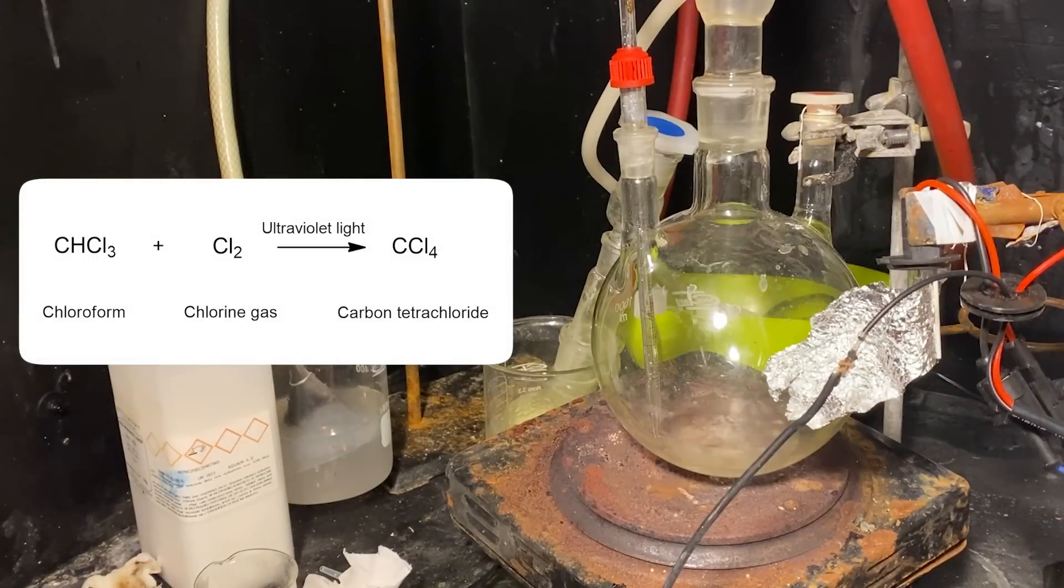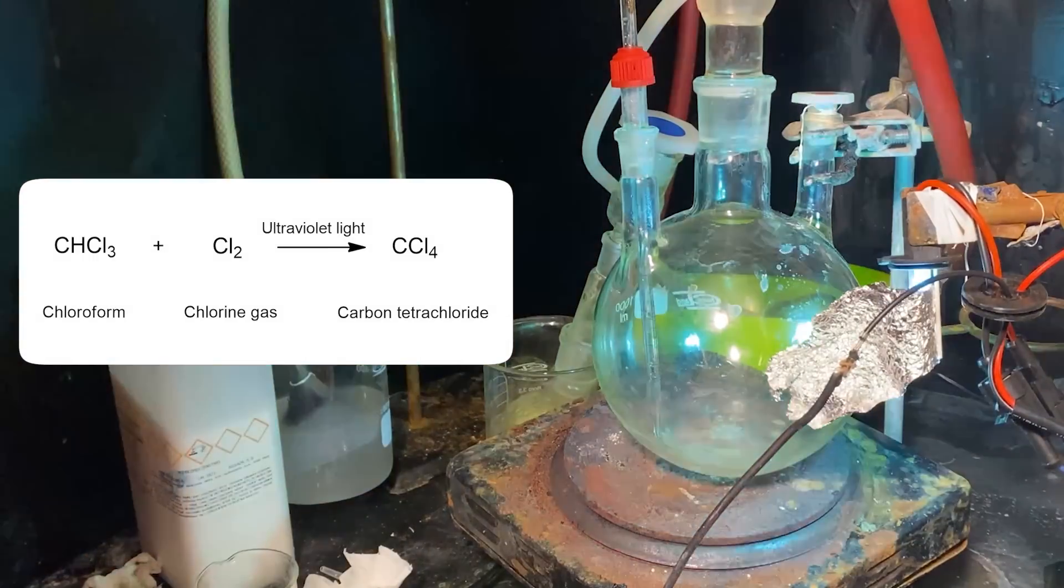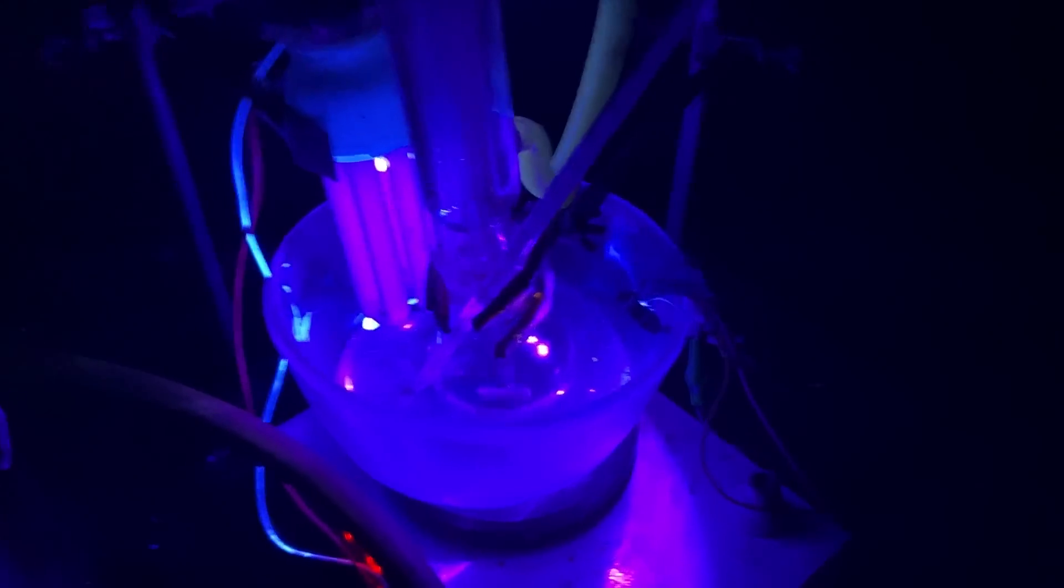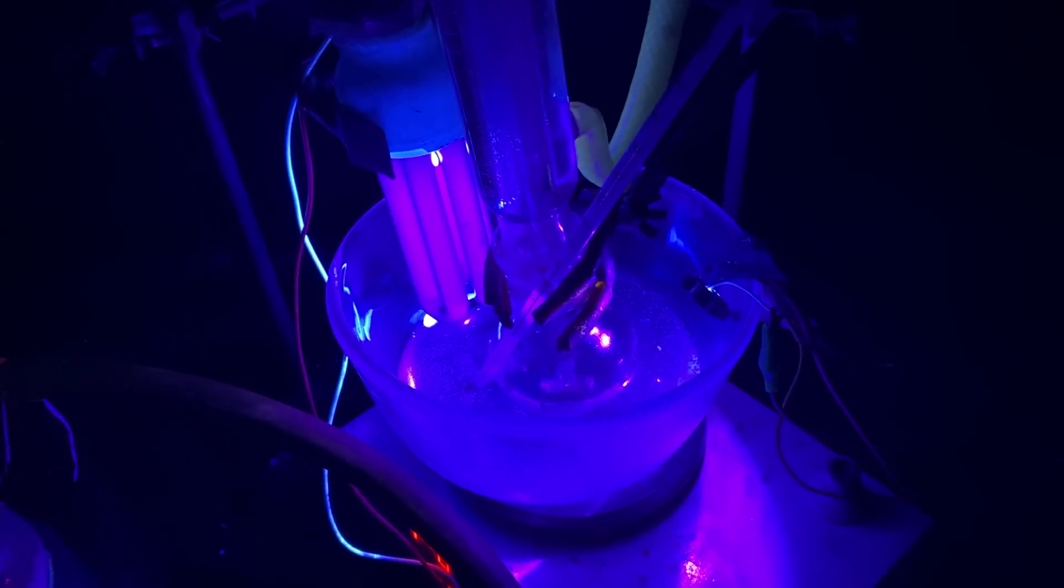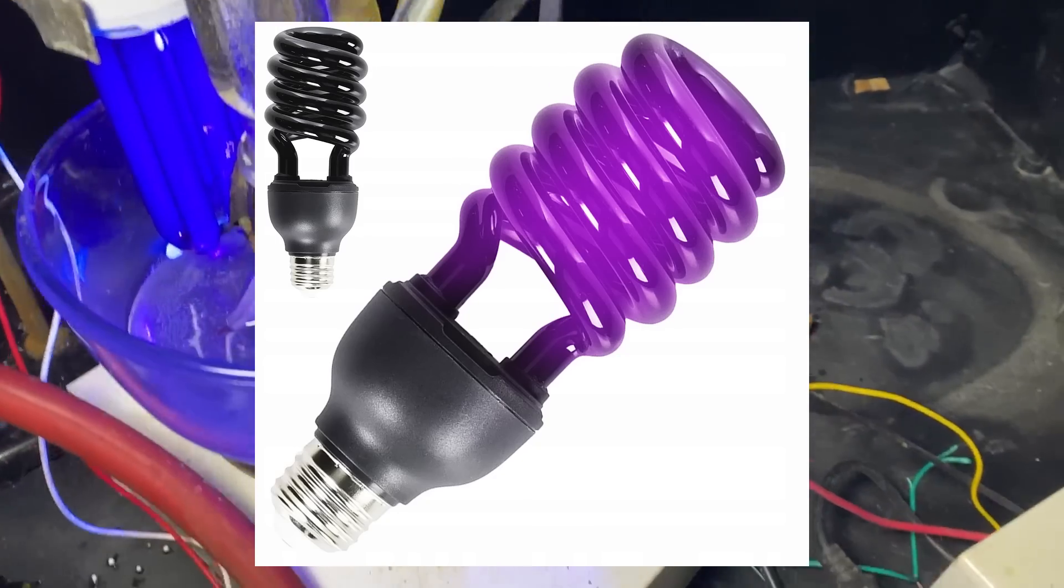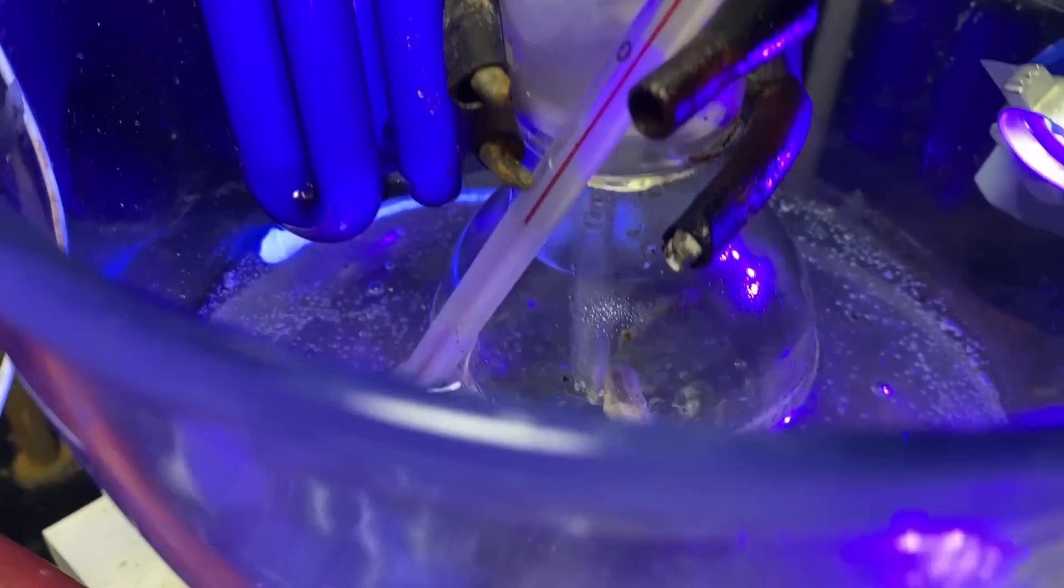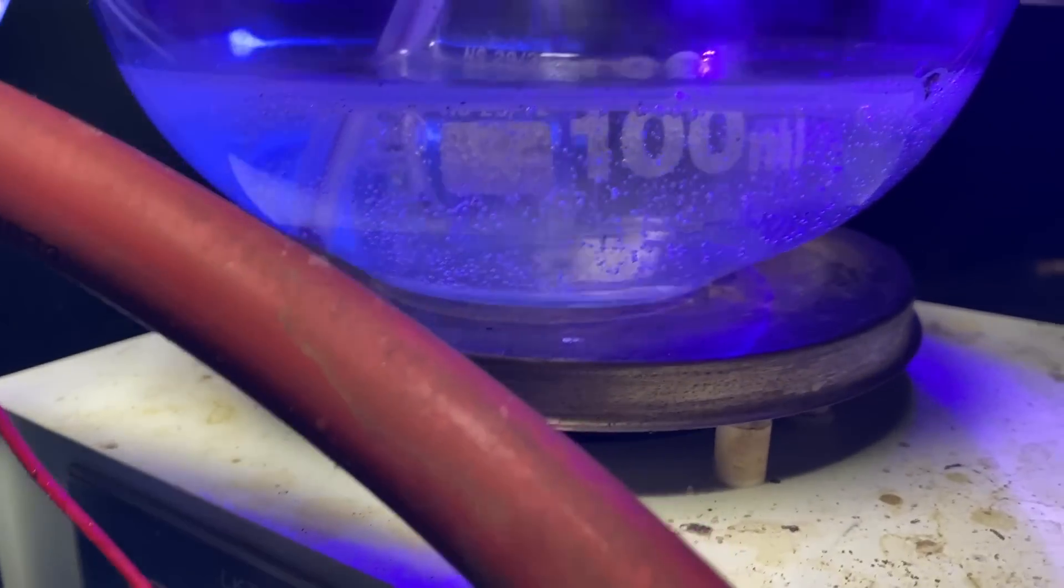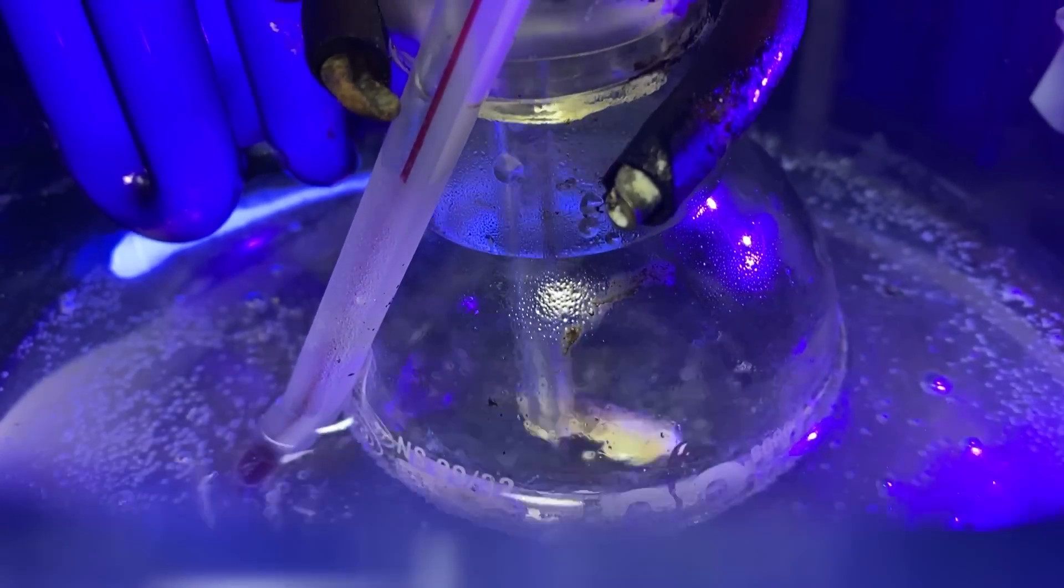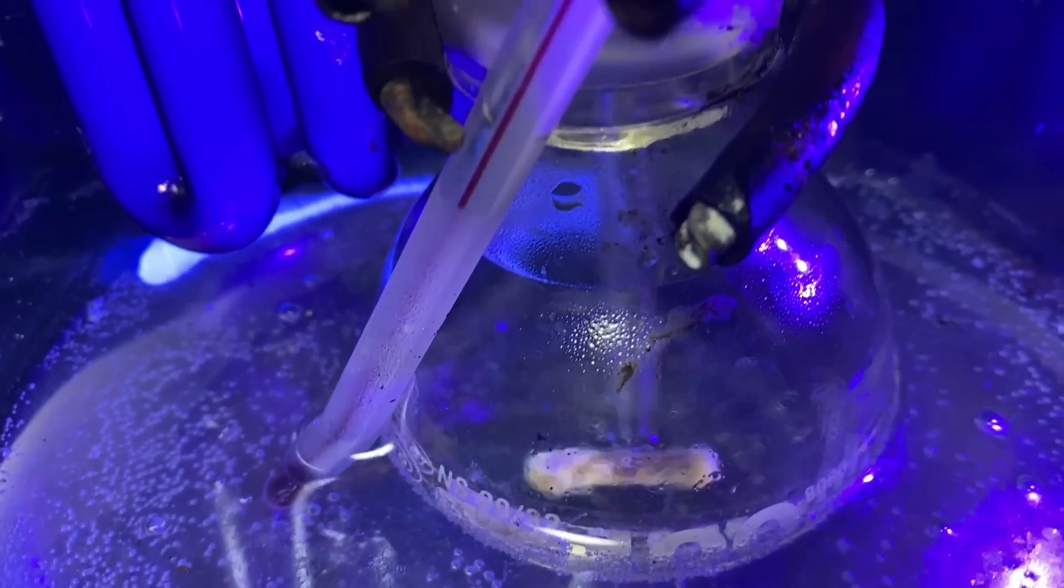The conversion of chloroform to carbon tetrachloride is very simple. All you have to do is pass chlorine gas through chloroform while it is being irradiated by UV light. This process is known as photolytic chlorination. And as the name suggests, you need a strong UV source and this is pretty much why my first attempt at making carbon tet failed. In a nutshell, it was because of those shitty UV lamps, which are pretty much just normal incandescent lights but with a purple filter that outputs extremely low amounts of UV radiation.